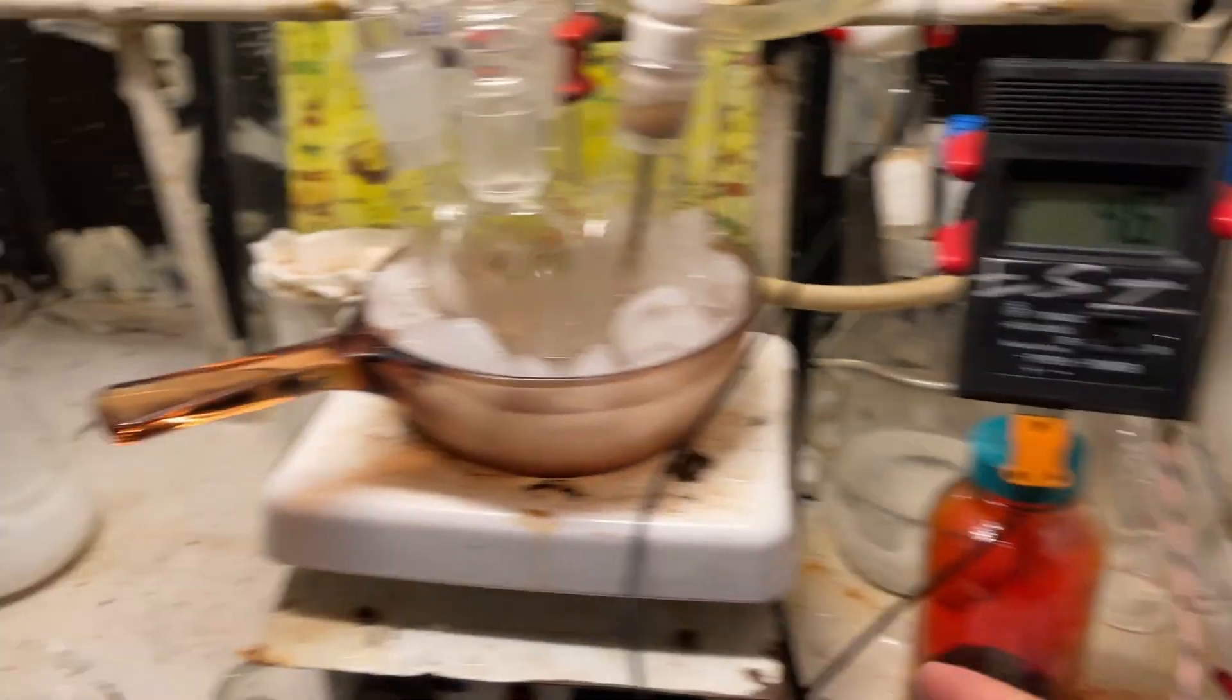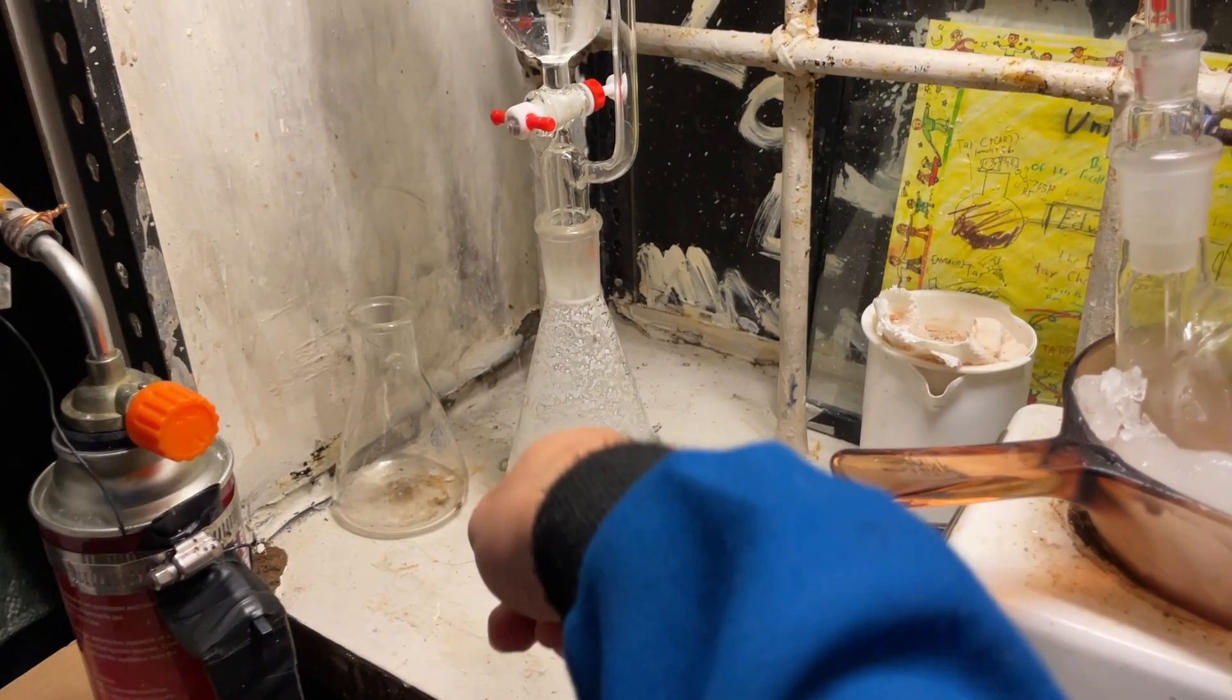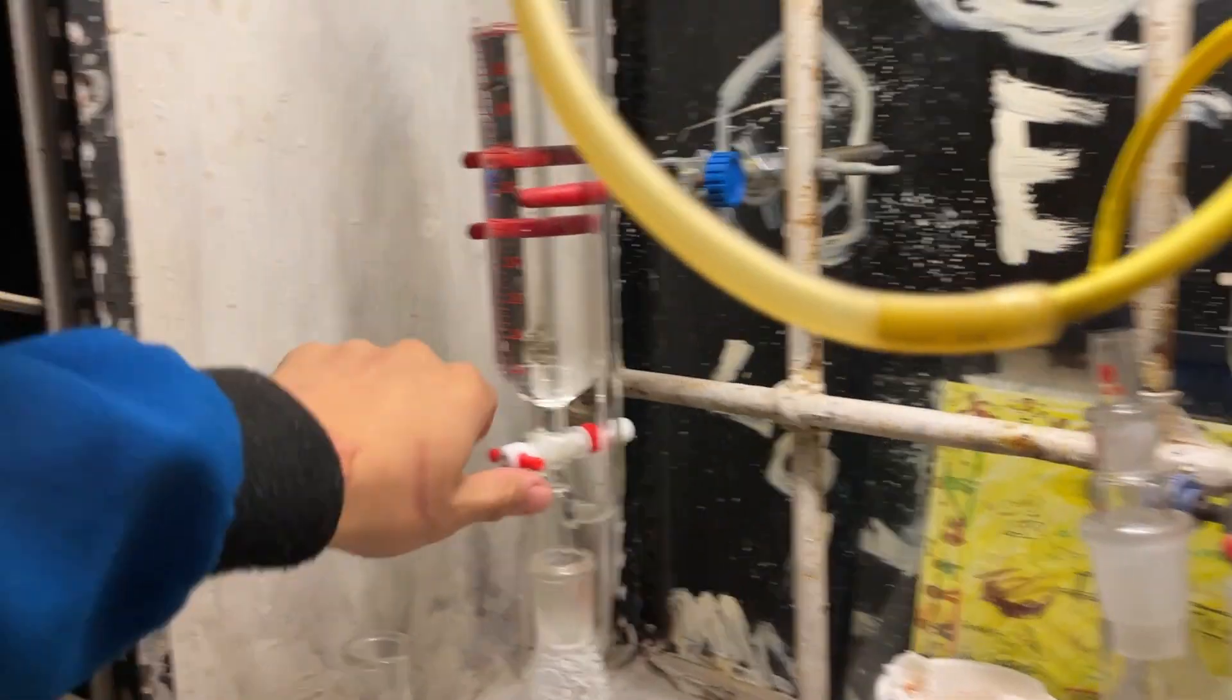Ethanol, ice bath, thermometer. Chlorine generator. And I found out the chlorine doesn't actually have to be dry. So it's just going directly in there.